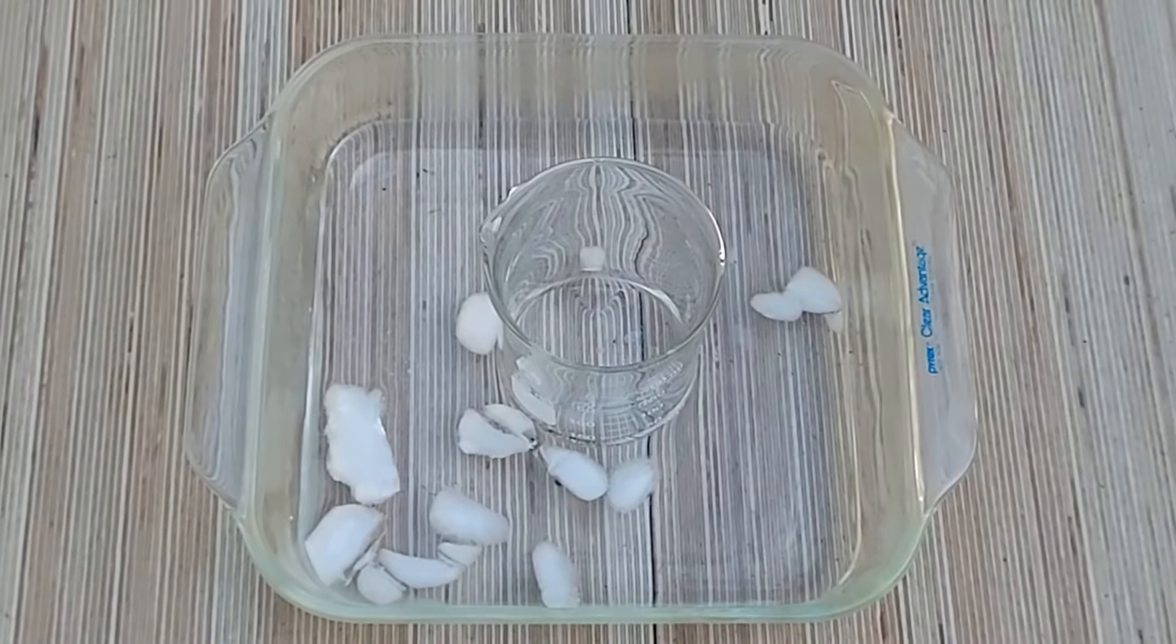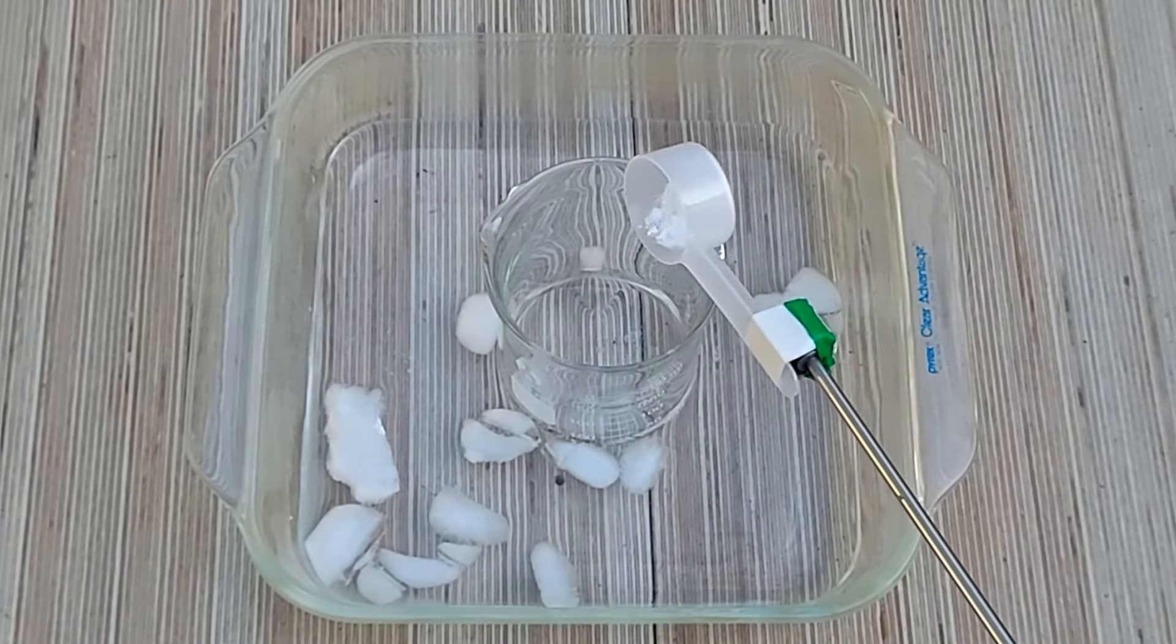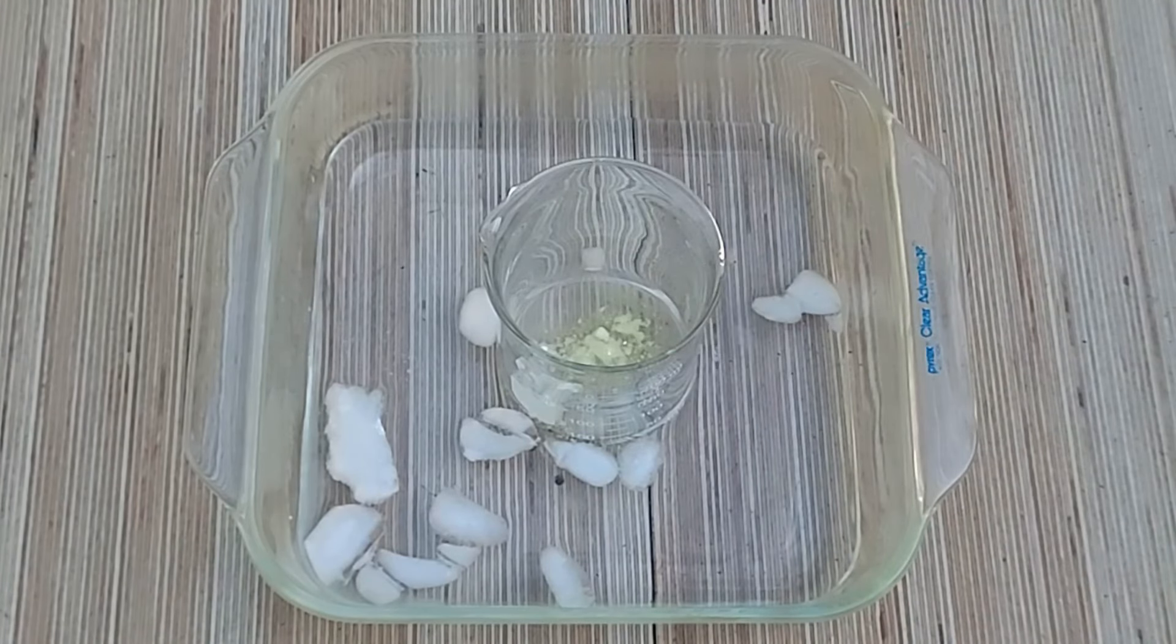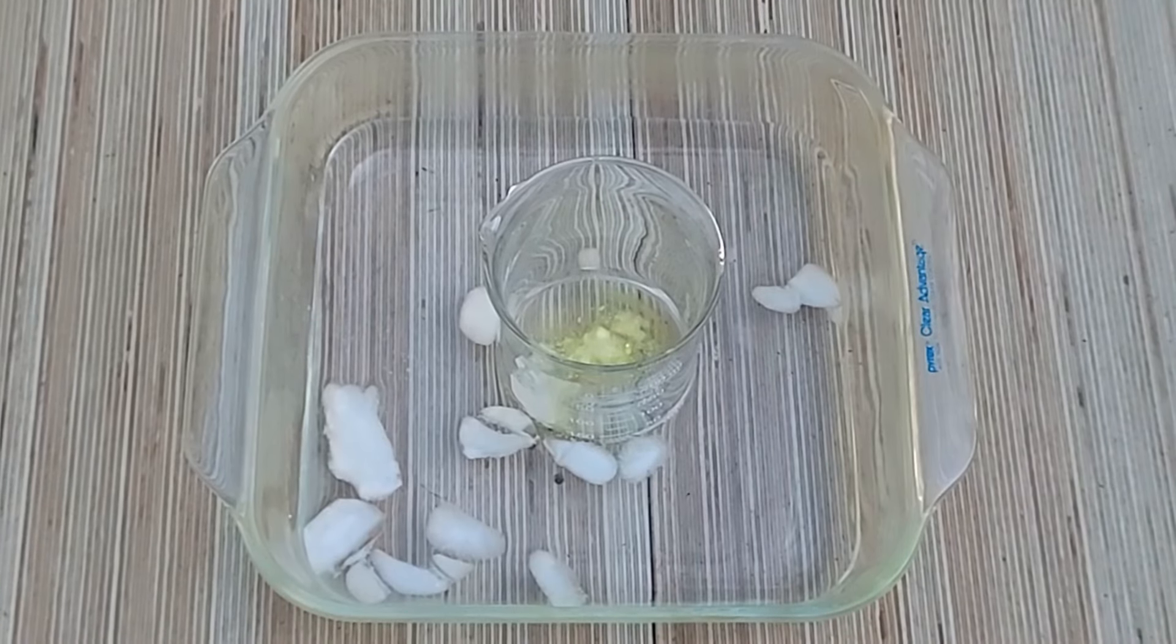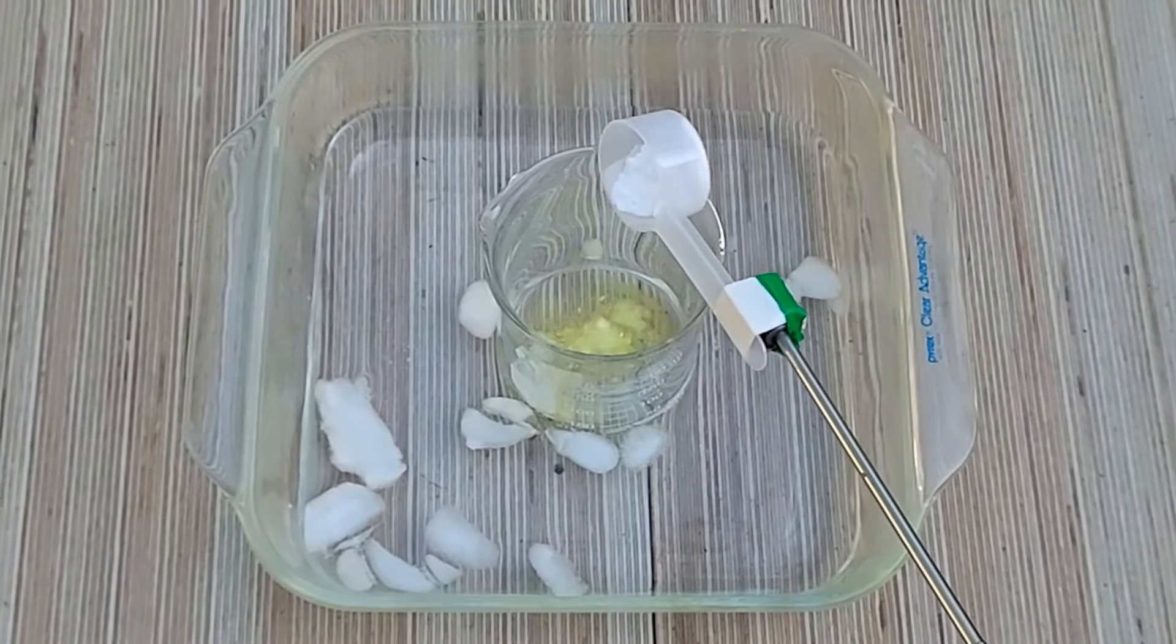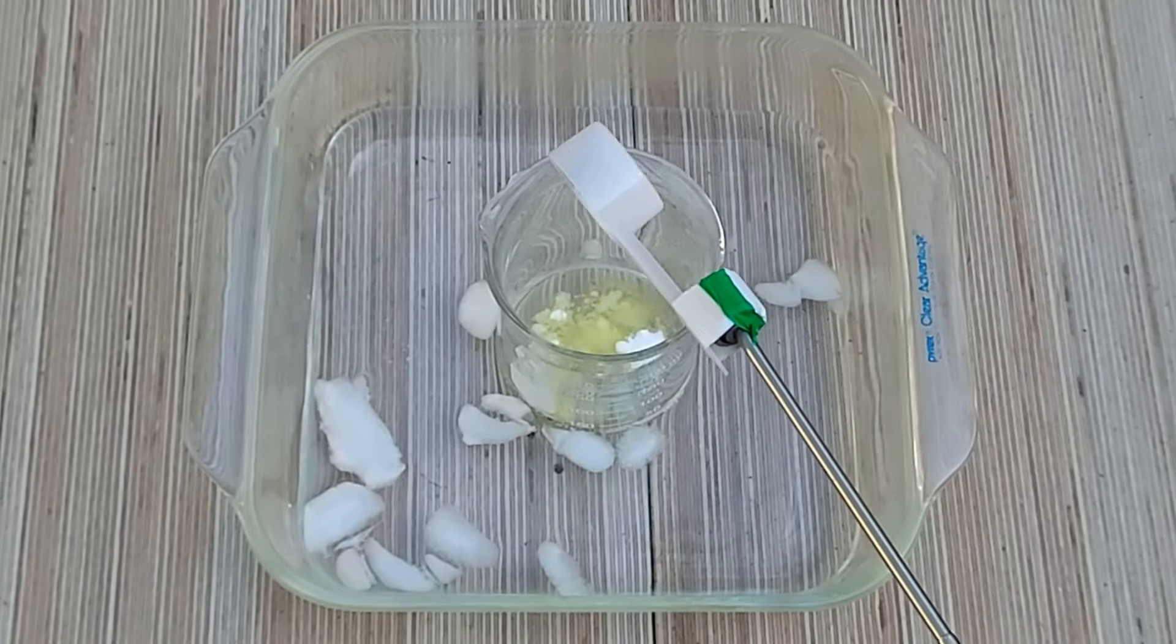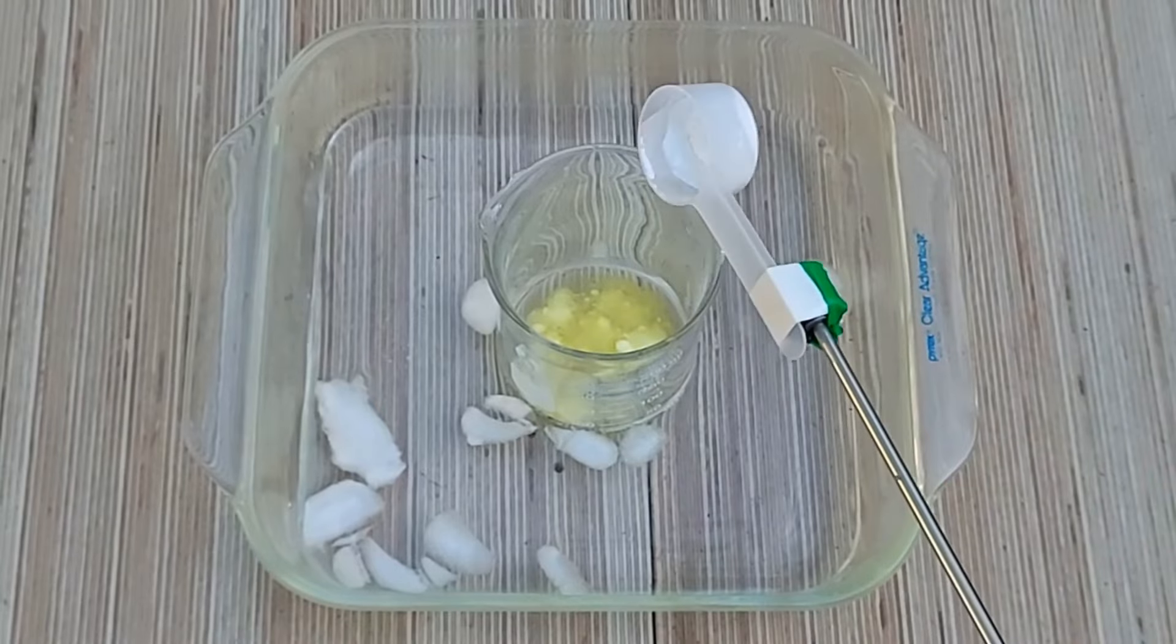I'll now be adding the first quantity of the potassium chlorate. The yellowish stuff you see near the bottom there is the chlorine dioxide, the serious gas and potentially very explosive. I'm now adding the second quantity here, and the last bit of potassium chlorate.